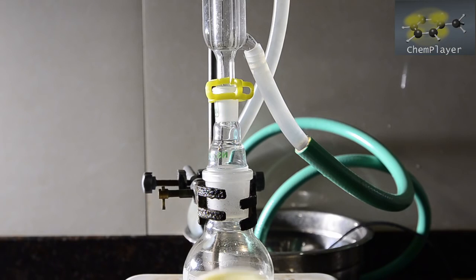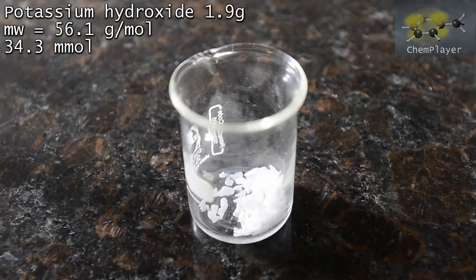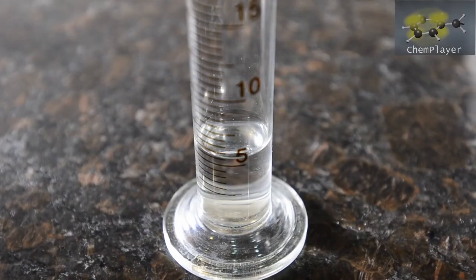At this temperature the solid isn't particularly soluble, so we now start to heat the mixture gently and get it up to almost refluxing. While it's heating we can prepare our other reactant. Here's 1.9 grams of solid potassium hydroxide. This is a 1.5 molar amount compared to the benzil. We're going to dissolve this in 5 ml of water.